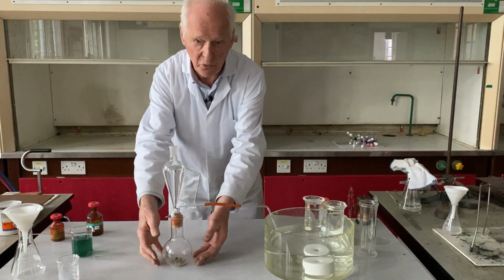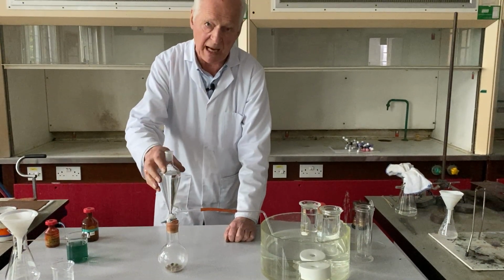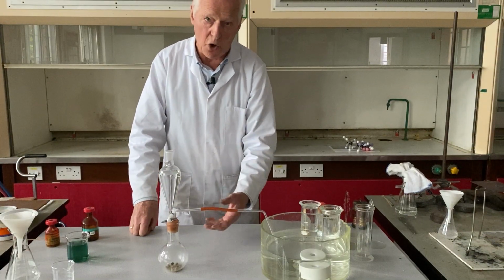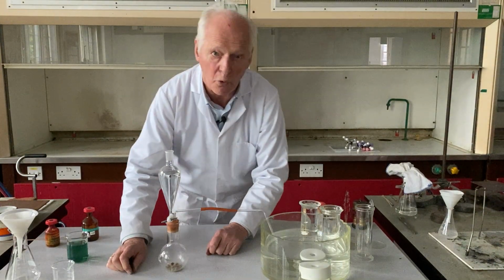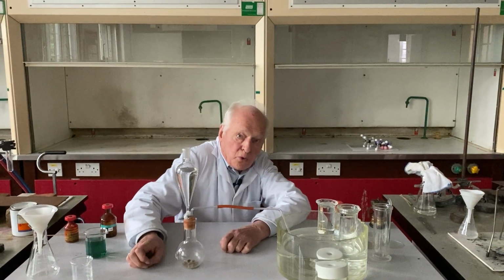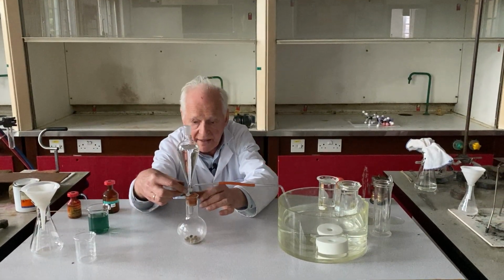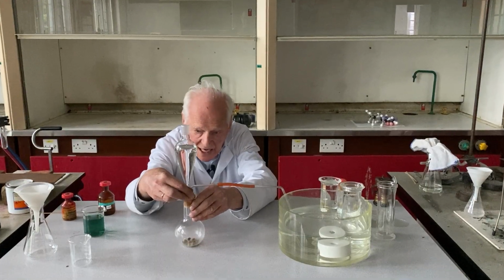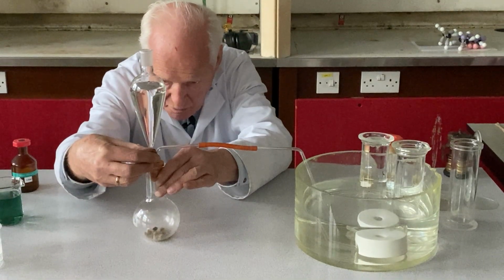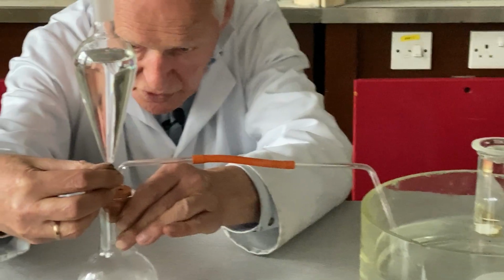In my flask here, I've already put in some calcium carbide. The tap funnel here contains water, and I'm going to collect the gas over water by downward displacement of water in a pneumatic trough. Now, to do this, I'm going to kneel down because I have to control the water flow onto the calcium carbide very carefully. If I allow too much water to run in, then the reaction will be over in a few seconds. So, if you don't mind, I'm going to very carefully open the tap, and as water hits the carbide, you will immediately see a lot of frothing and bubbling.